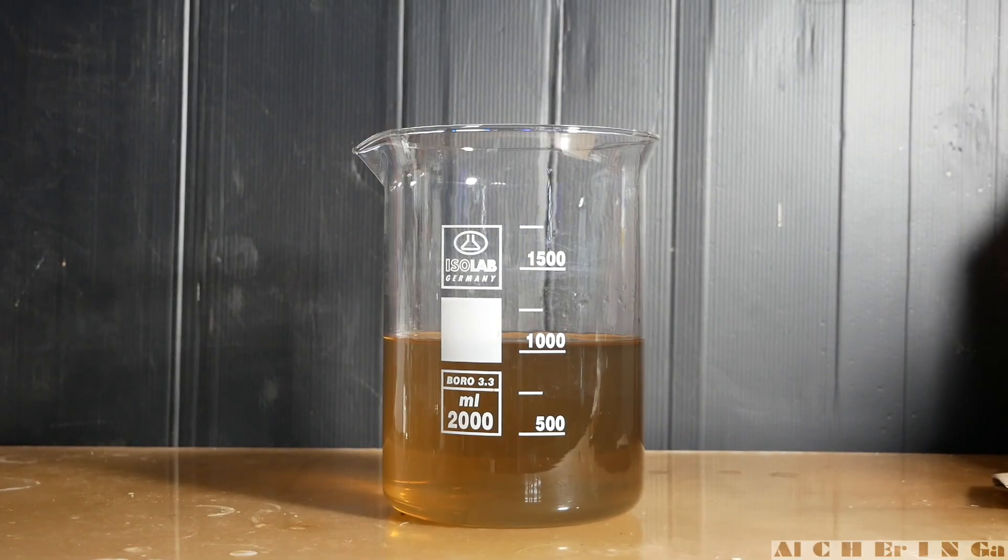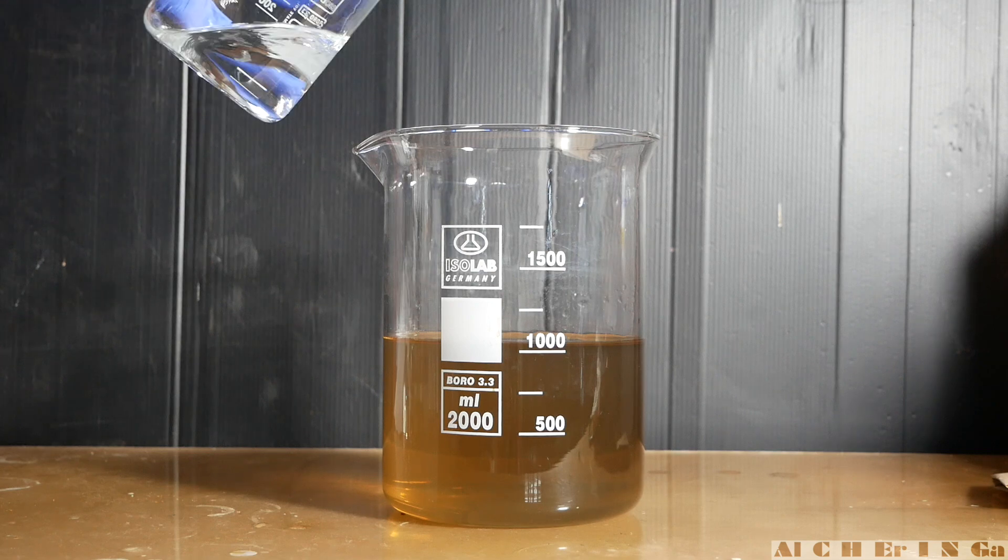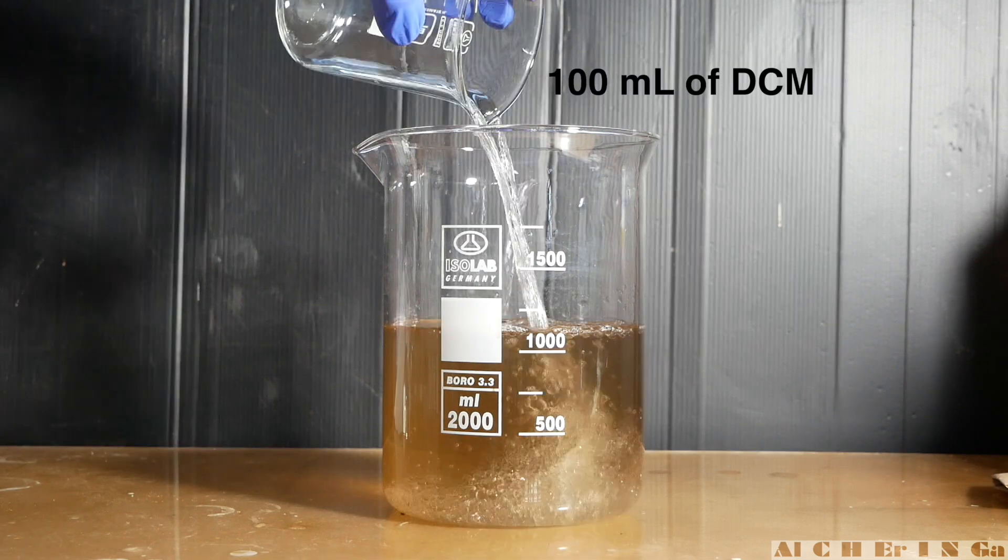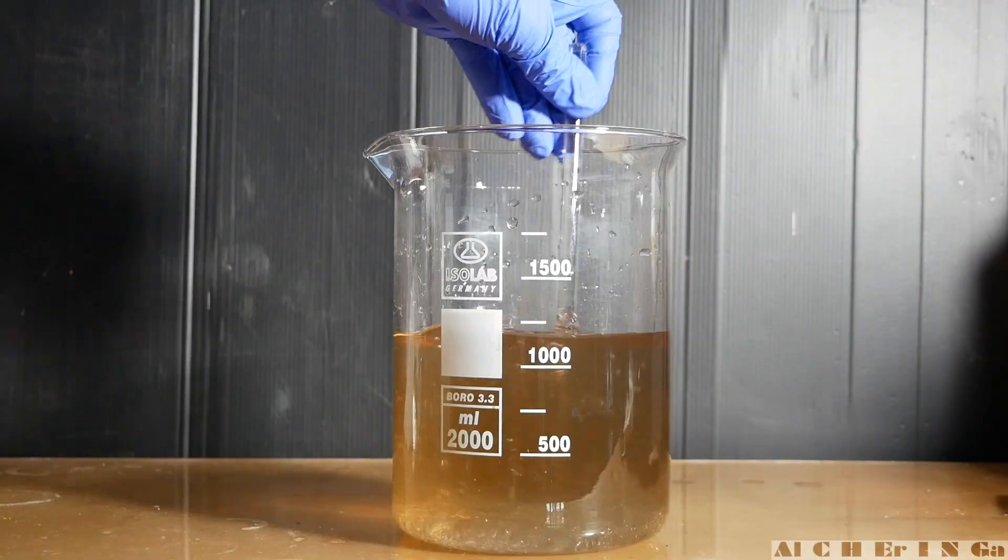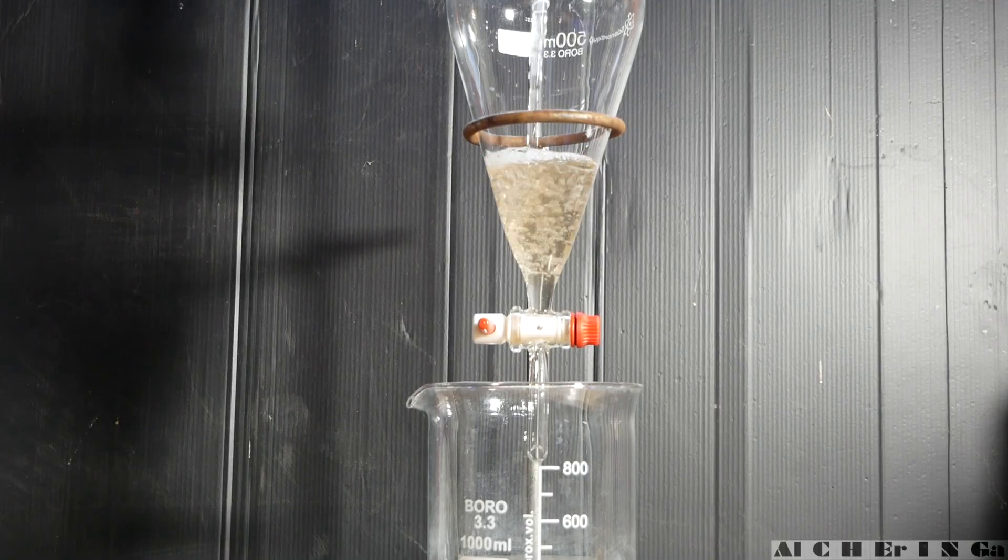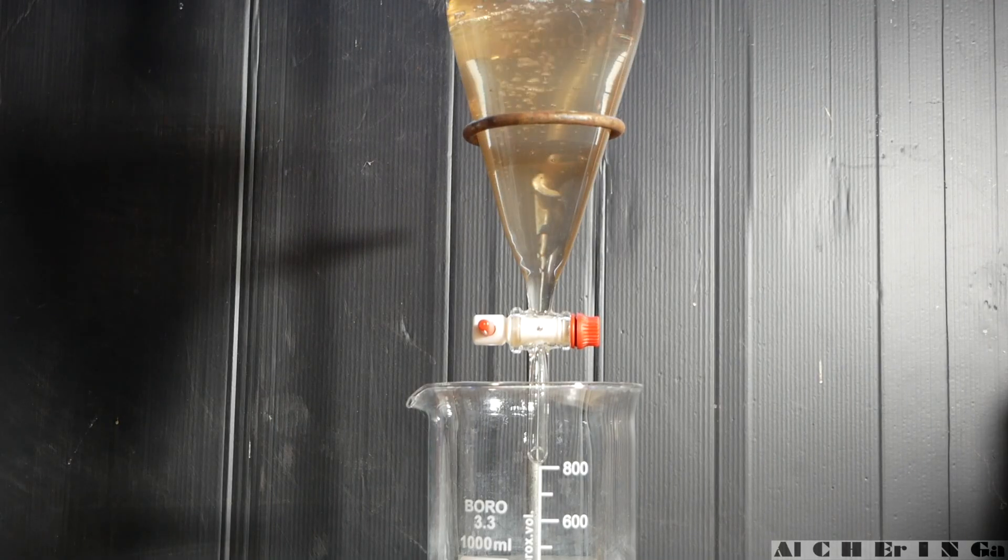Okay now, we have to extract the unreacted 1-phenyl-2-propanone from the reaction mixture with dichloromethane. Add 100 milliliters of dichloromethane. Stir the mixture thoroughly. Pour the contents into a separatory funnel and conduct the first extraction.